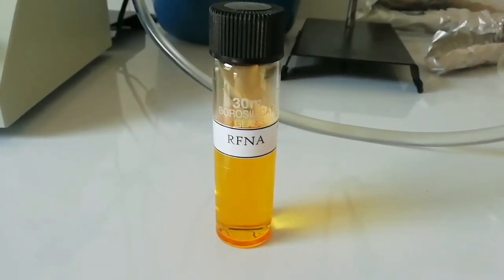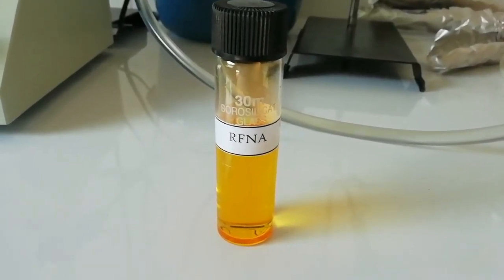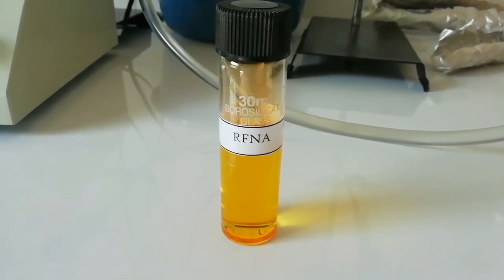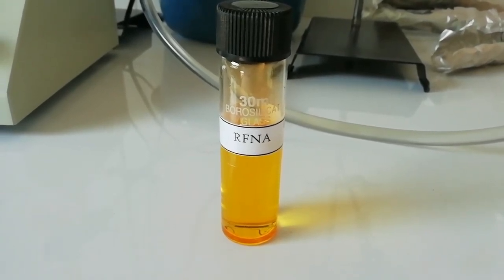Right now you can see this is our final product red fuming nitric acid, and I have about 20 milliliters of red fuming nitric acid here.